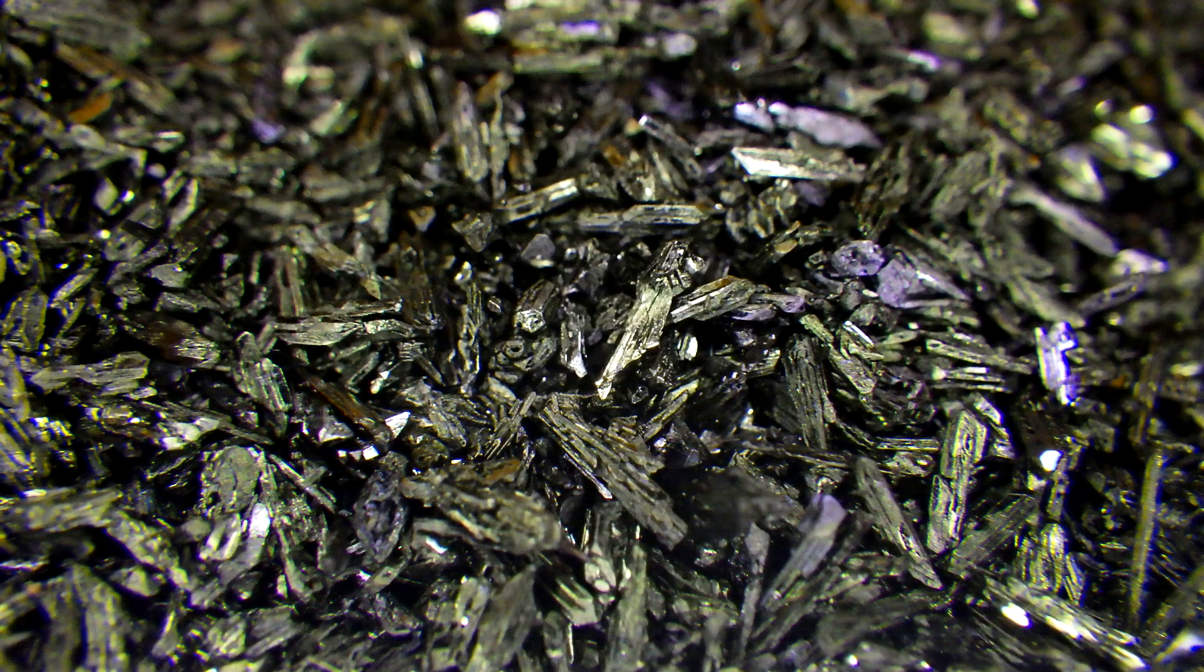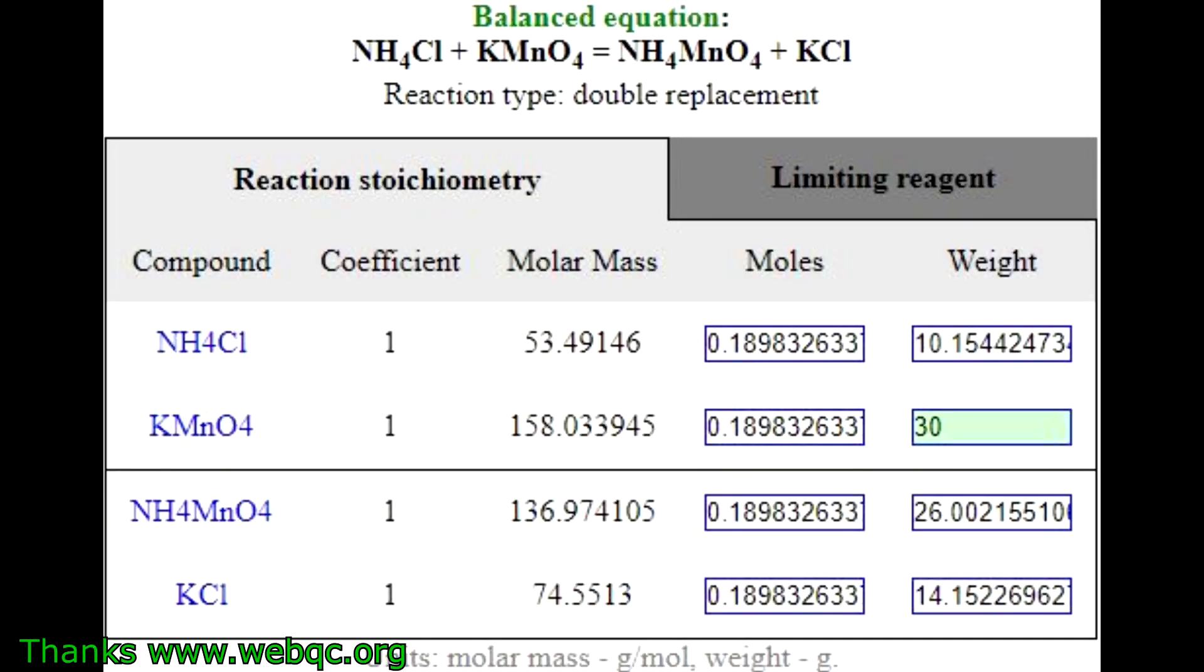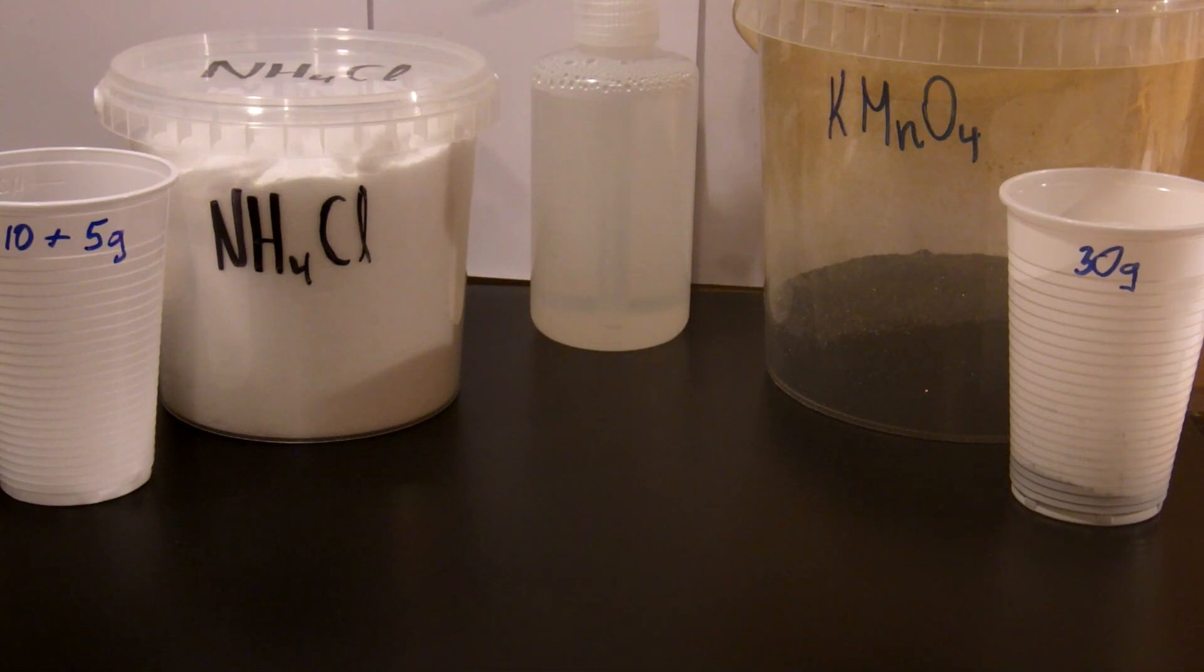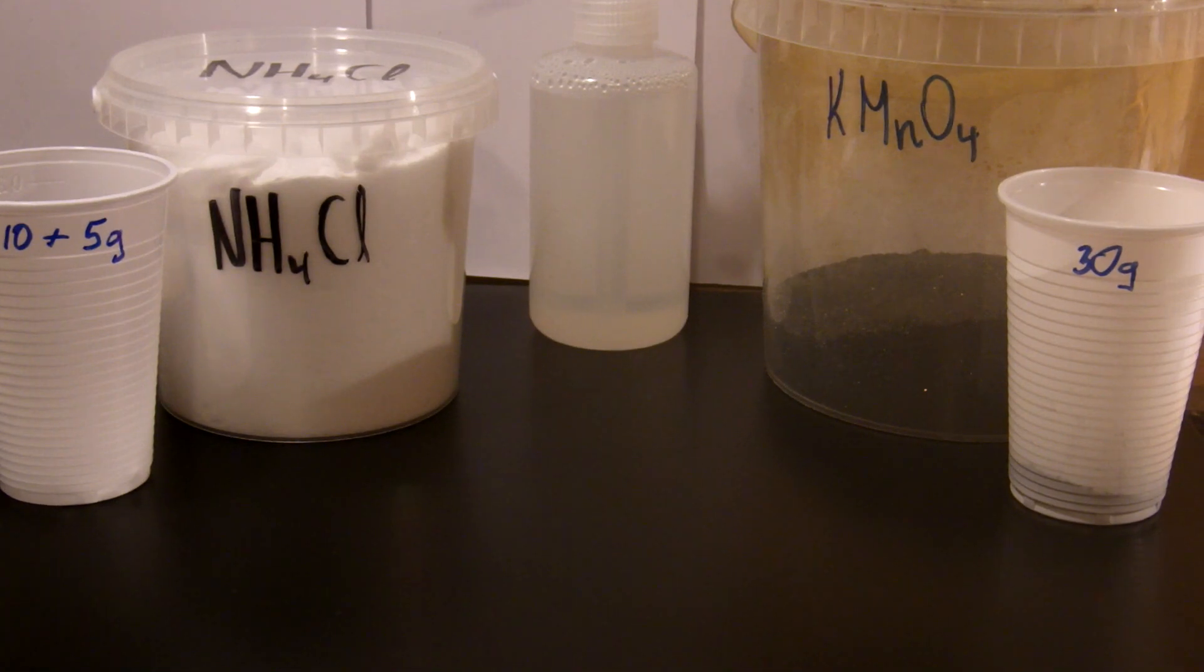I am going to use only two chemicals for this single reaction: potassium permanganate and ammonium chloride. I am basing this reaction on potassium permanganate. I will use 30 grams of it. For that I'll need little over 10 grams of ammonium chloride, but I'll use 50% excess, so 15 grams. I have already weighed the chemicals.